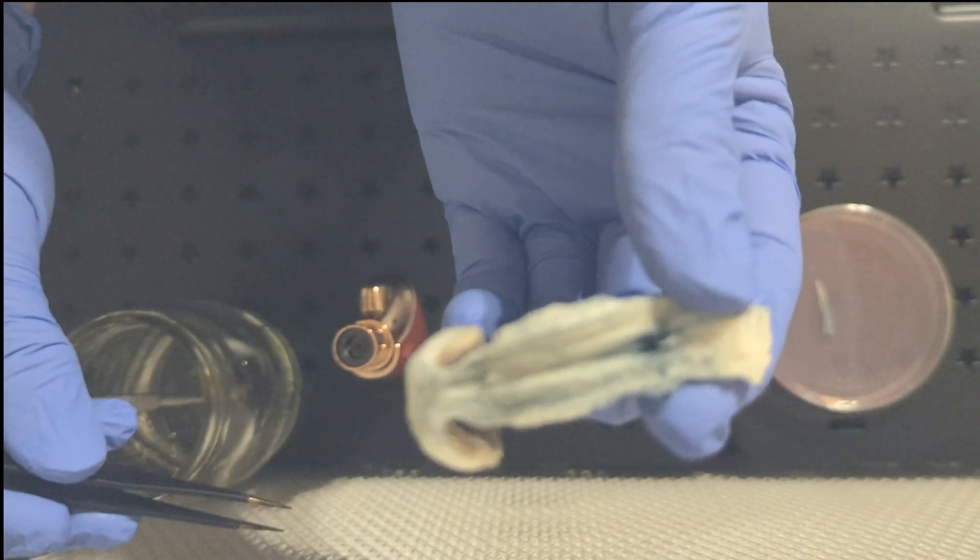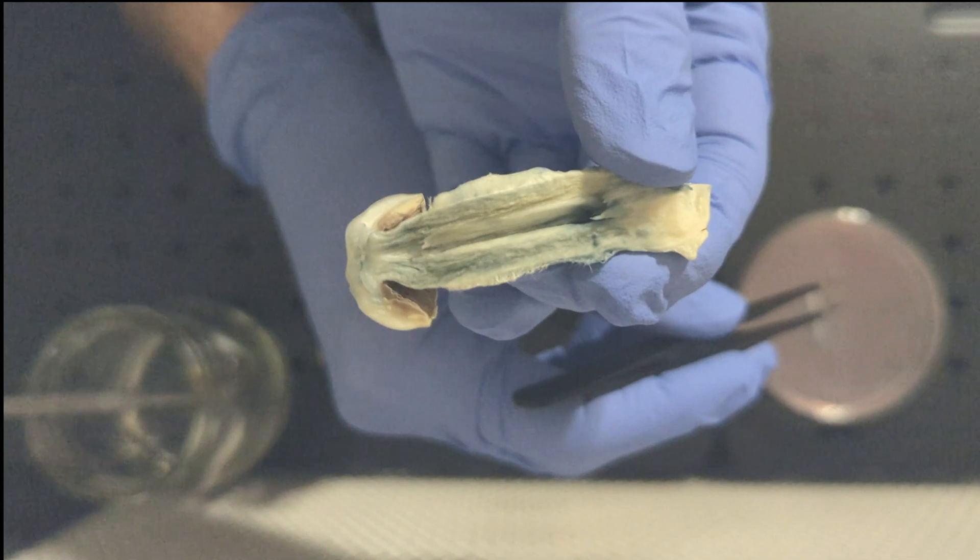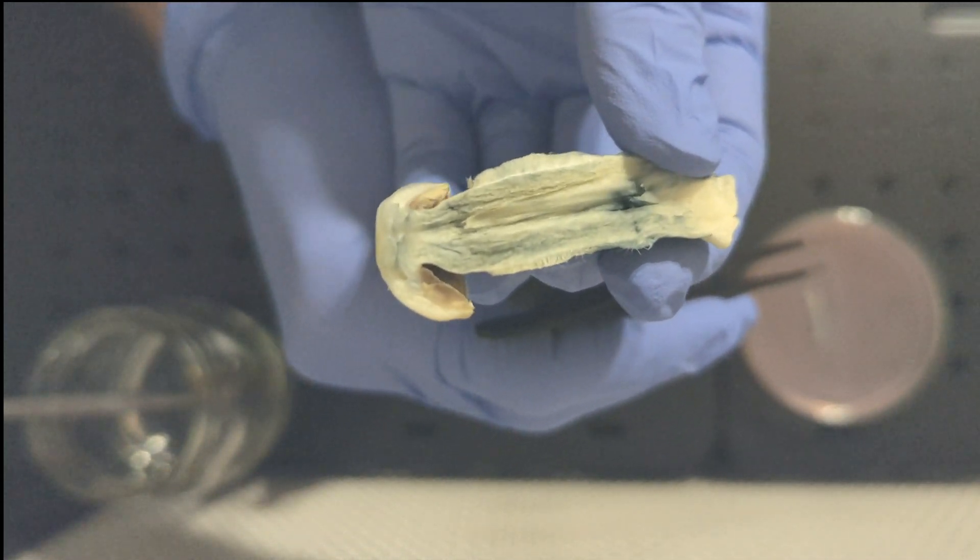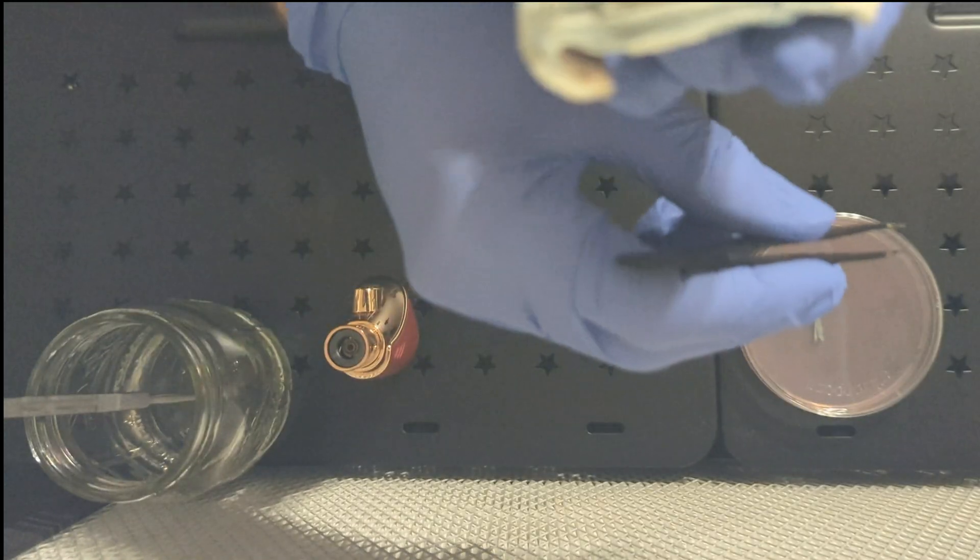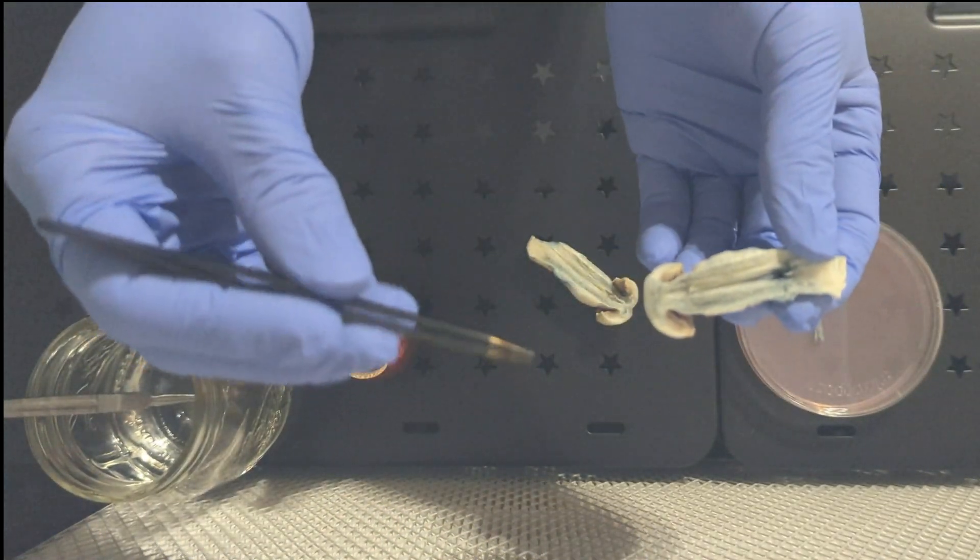How do you know what to pick? That's going to depend on what you're trying to do or what you want. If you want to go for canopies, you would select a mushroom from a cluster of mushrooms. If you want to have bigger mushrooms, you select the biggest mushroom. Whatever you select for, in theory, can regrow with some exceptions.